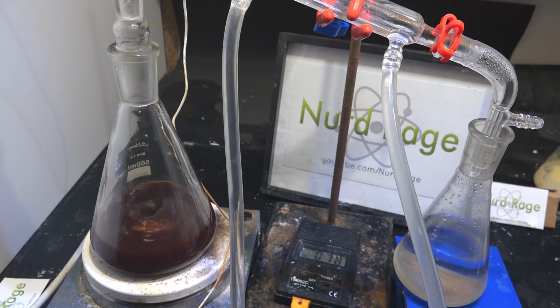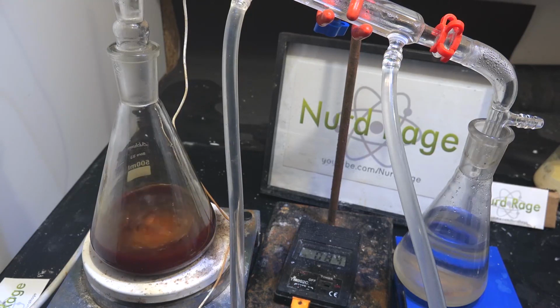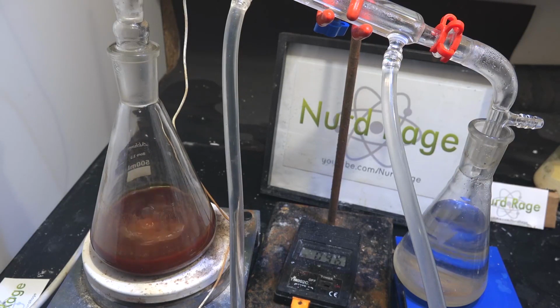Keep boiling until the distillate temperature goes past 90 Celsius. At this temperature, most of the methanol will have boiled off, and conveniently, toluene and dioxane will also boil off since they form azeotropes with water below this temperature. Now turn off the heating and let it cool.